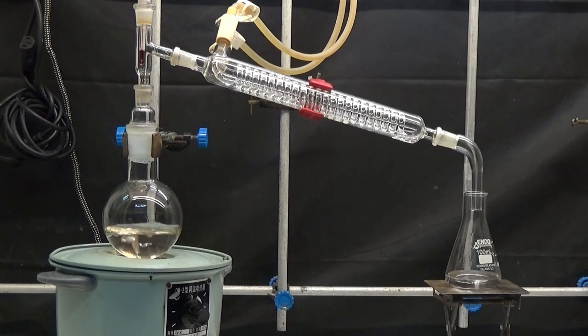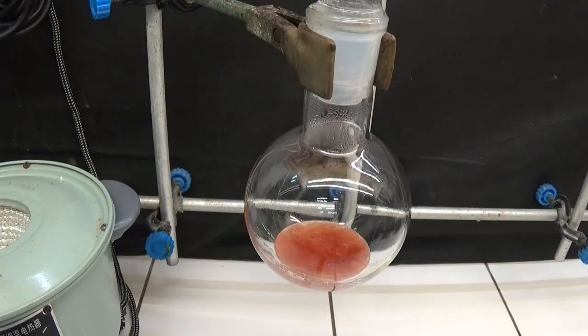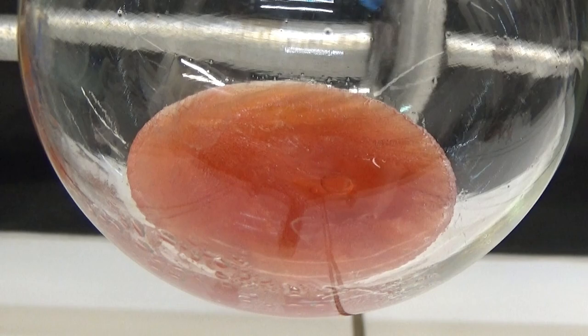Distill all that ethanol. A reddish residue remains in the flask, which we allow to cool.